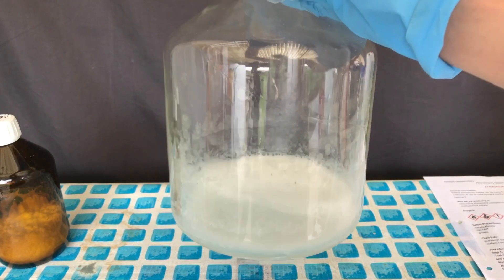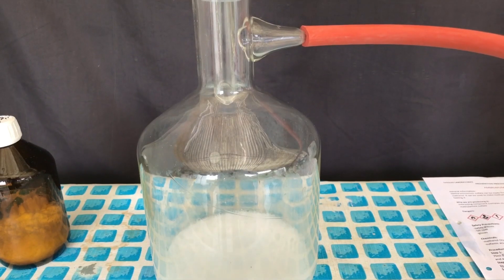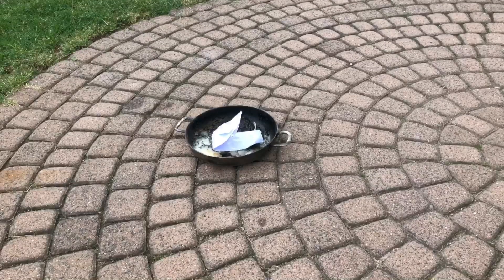Some product decided to crystallize out in the filtration flask. We might be able to filter this again, but I decided against it because we already collected enough product.